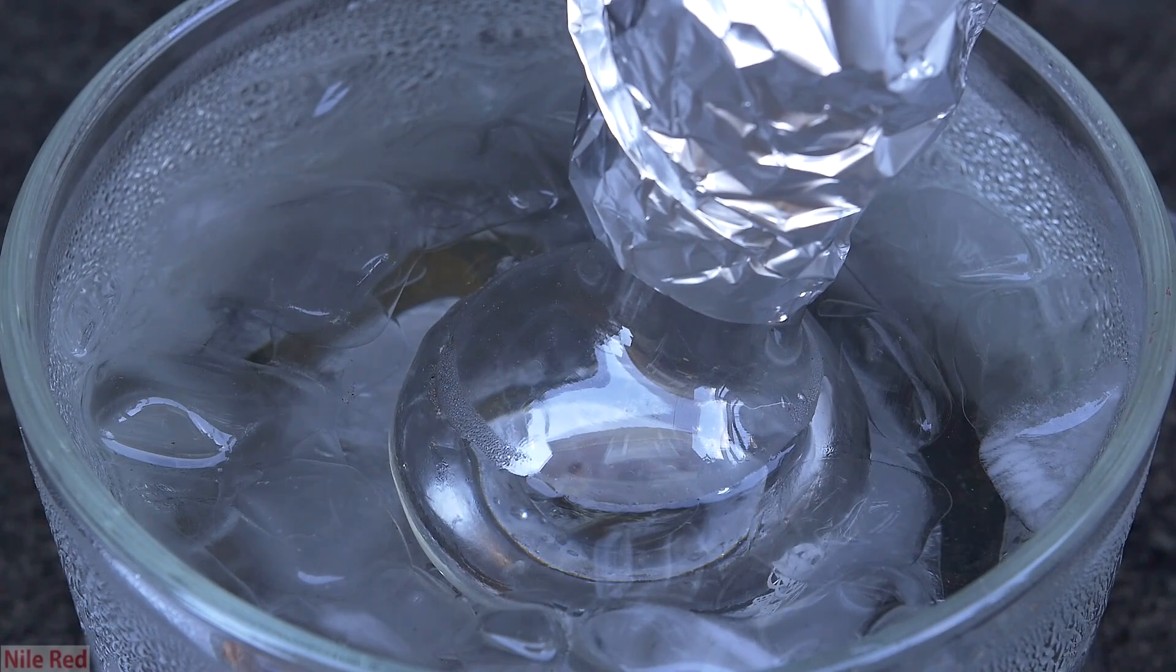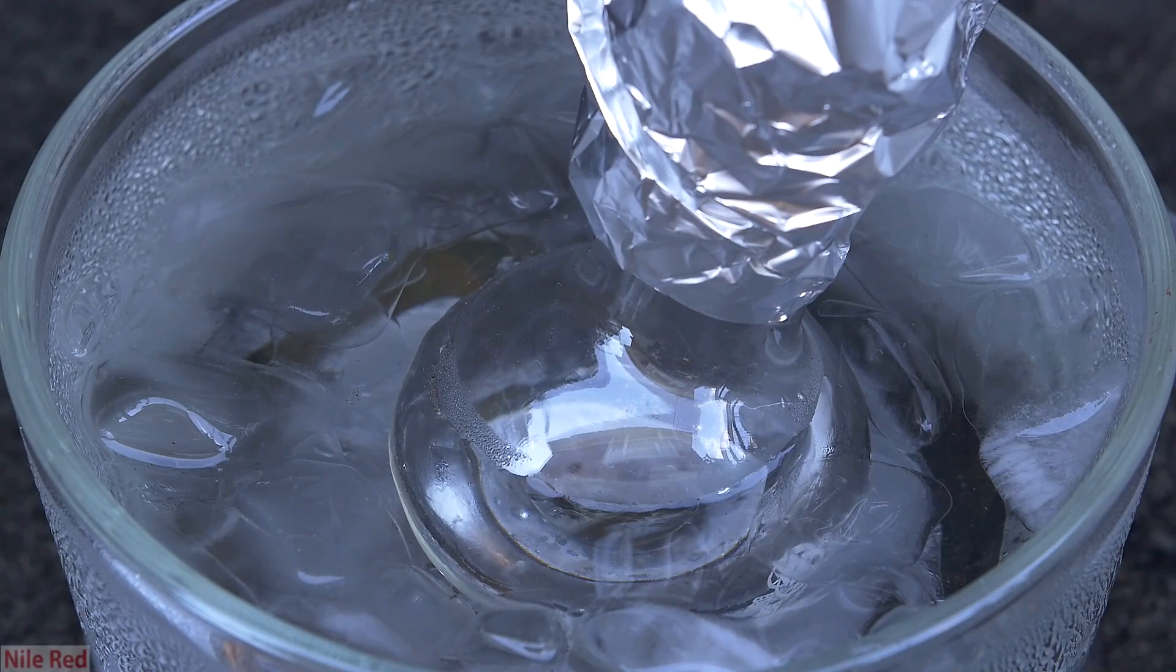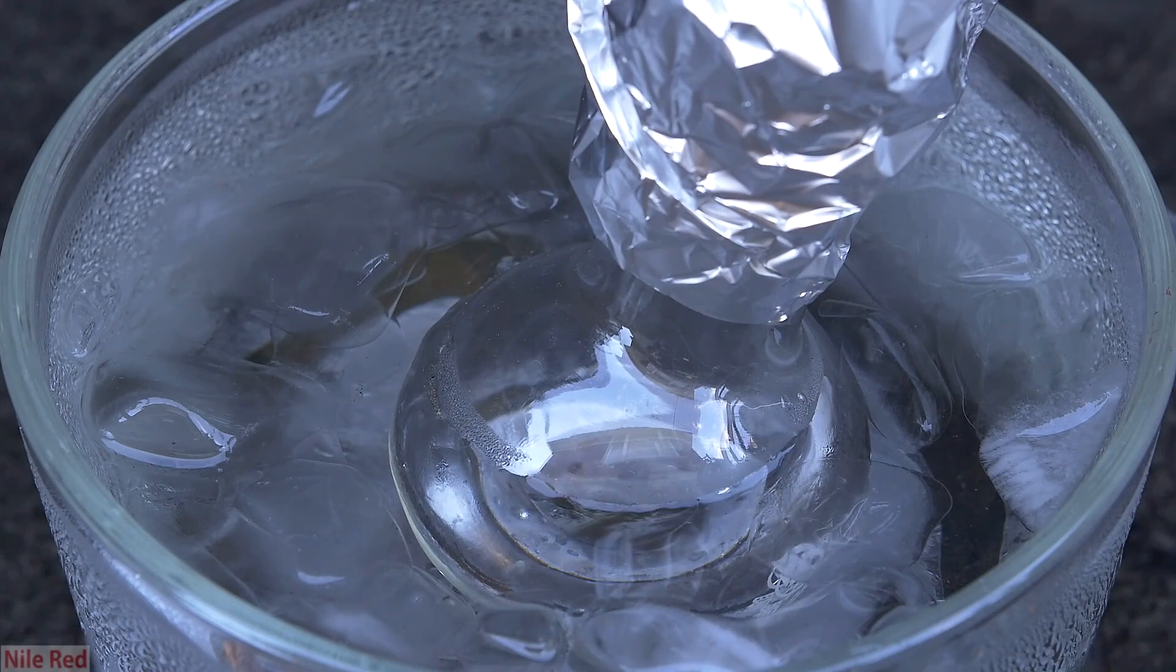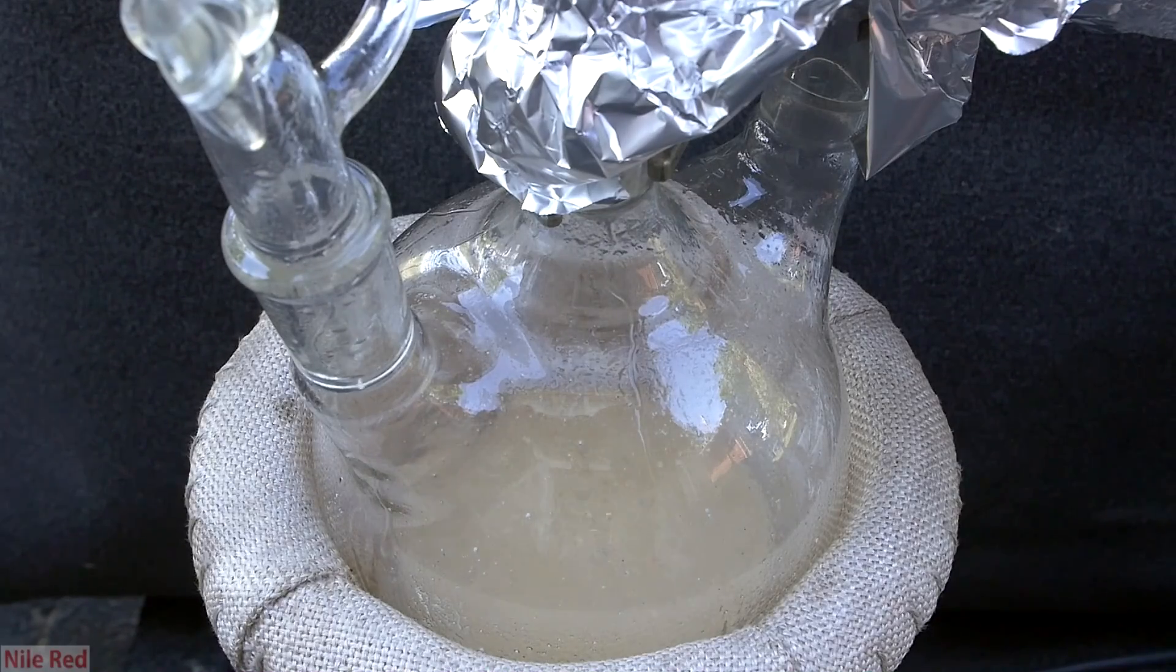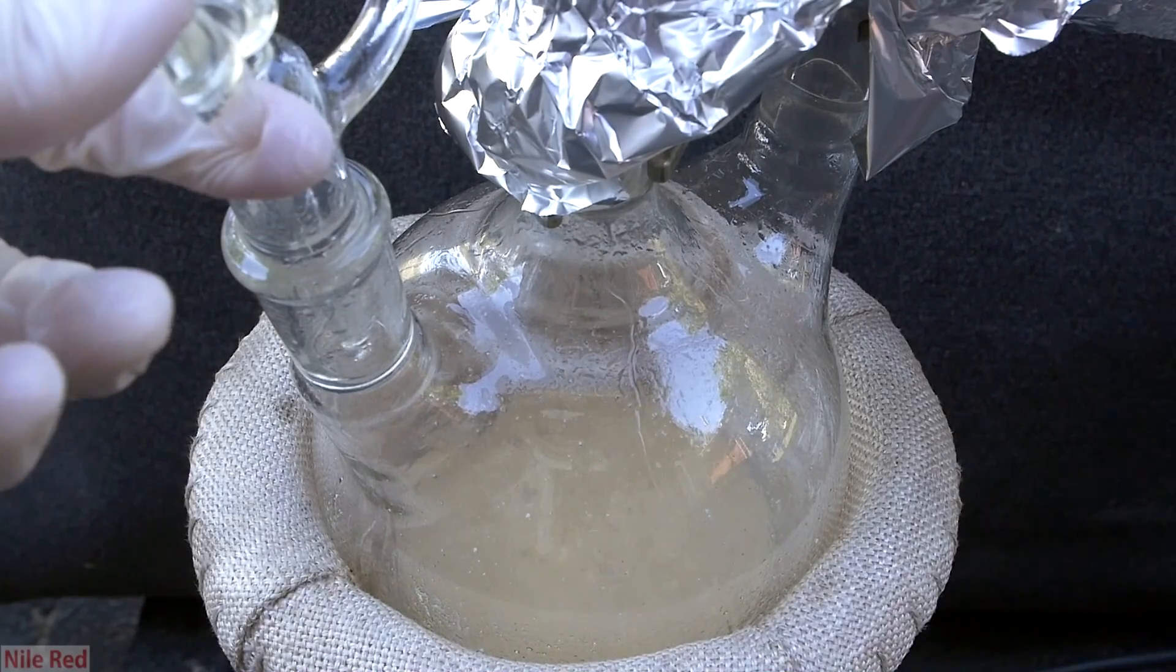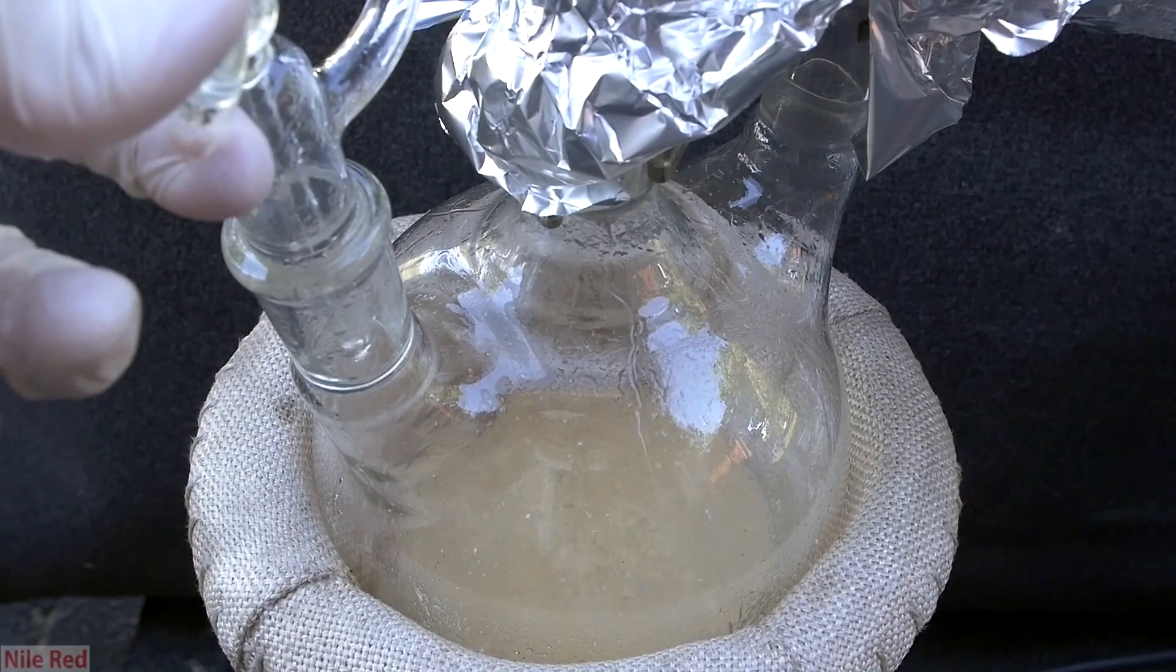I don't show it here, but I covered the entire bowl with aluminum foil to again prevent polymerization. After we started to collect some stuff in the receiving flask, I open up the addition funnel, and I start to slowly add more glycerol.